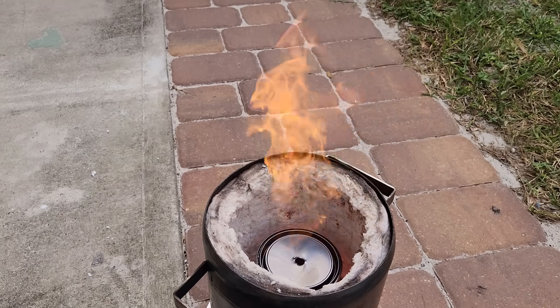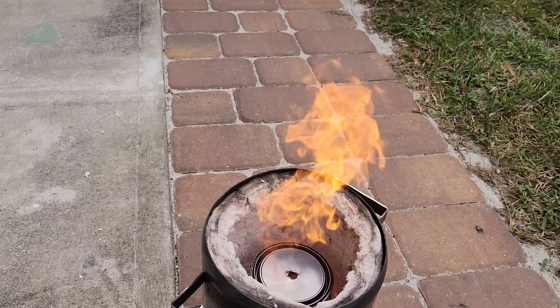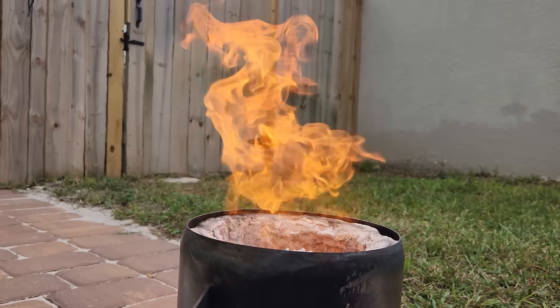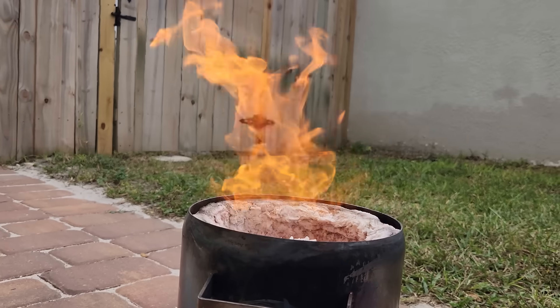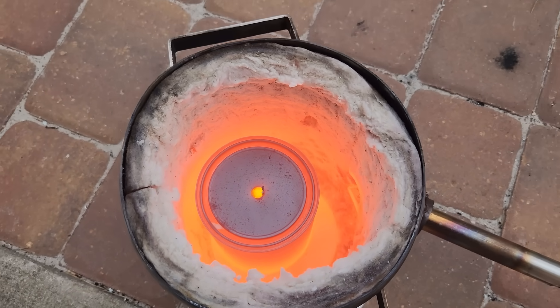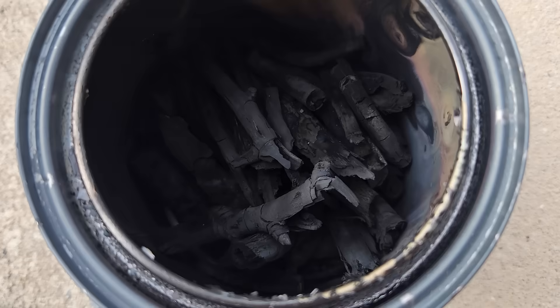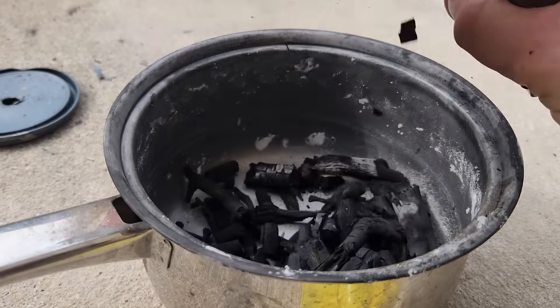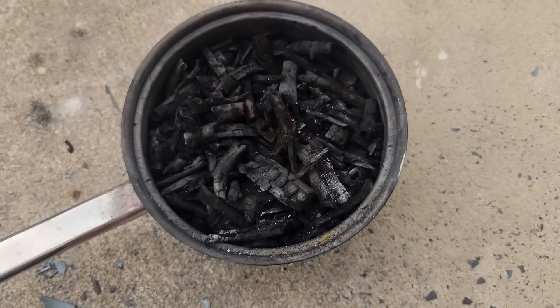The flame you see here is not from the propane, but rather from the gases and other volatile compounds coming out of the wood and igniting. This is what's known as wood gas. I could go into more detail on its production and use, but I think that subject deserves its own separate video. The wood container should be glowing red hot, which will help drive out the heaviest decomposition products to make sure the charcoal is as pure as possible. When the can is removed, we're left with charcoal, so I'll dump that out and keep doing this until I've cooked all of the driftwood.